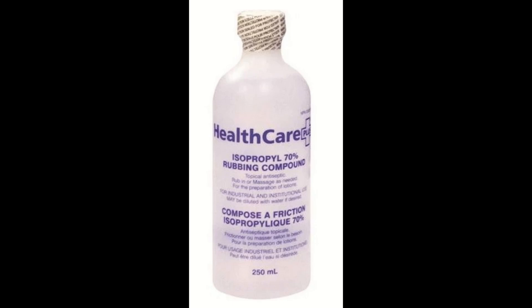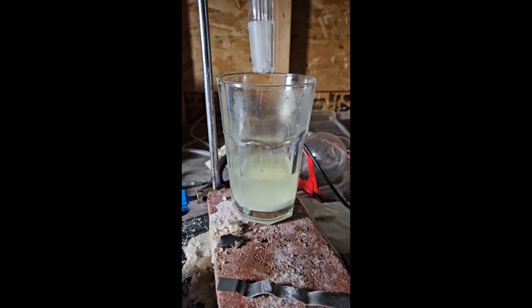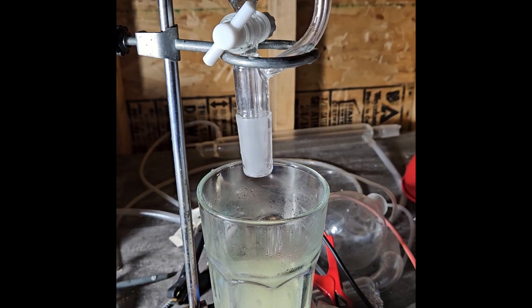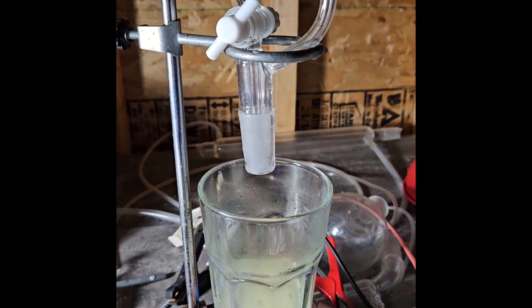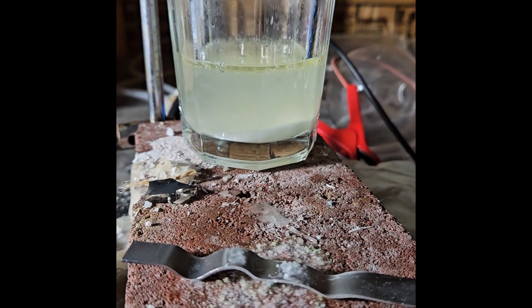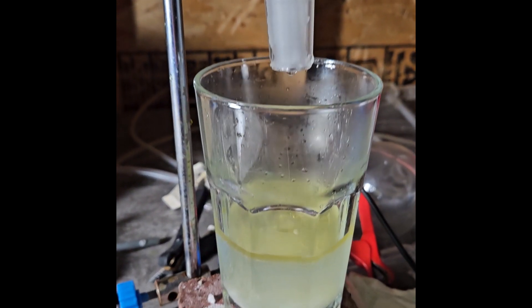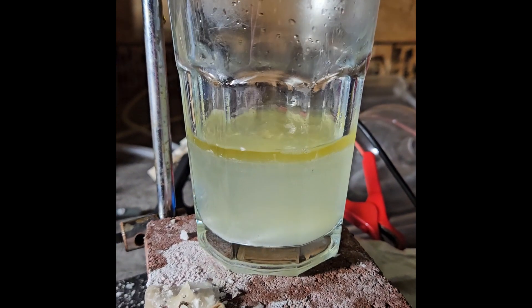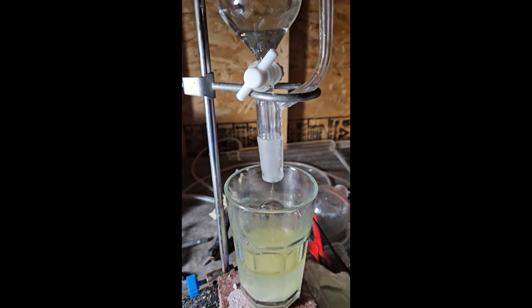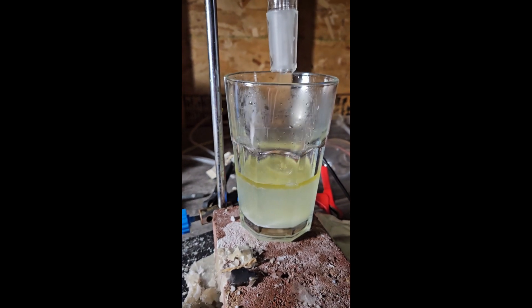I first prepared an ice-cold solution of the isopropyl alcohol and hydrochloric acid and added it to an addition funnel. I also prepared a cold solution of sodium nitrite in water. The sodium nitrite didn't fully dissolve but that's okay, it will. Using the addition funnel I added the acidified alcohol mixture dropwise to the sodium nitrite solution.